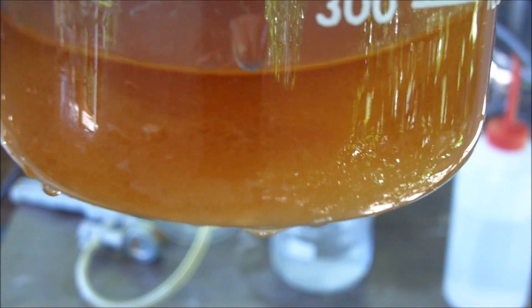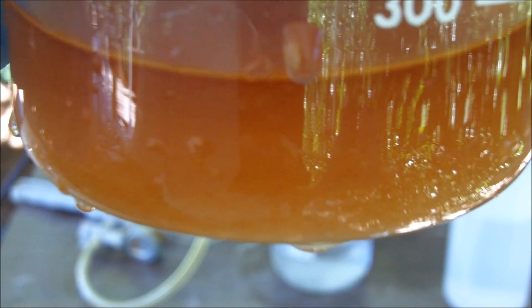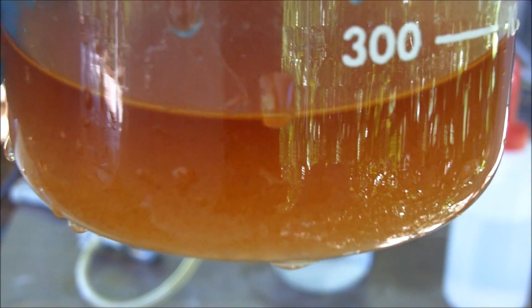And look at that, we are getting pretty nice crystal formation. I will keep cooling it and stirring it and then vacuum filter.